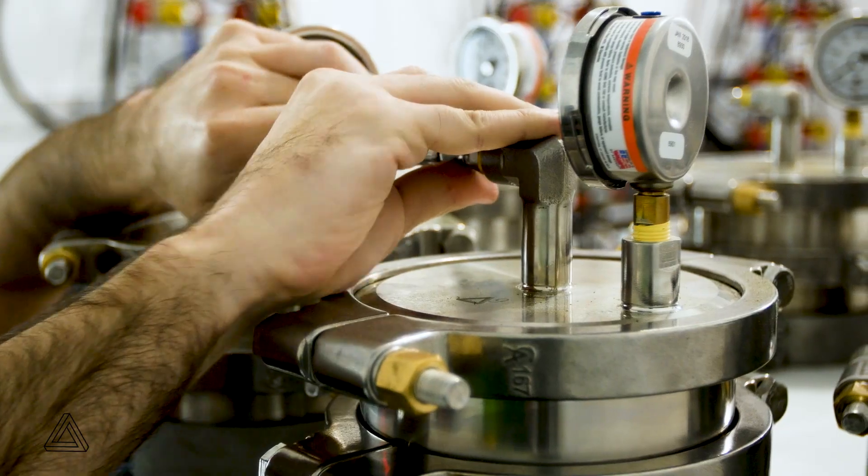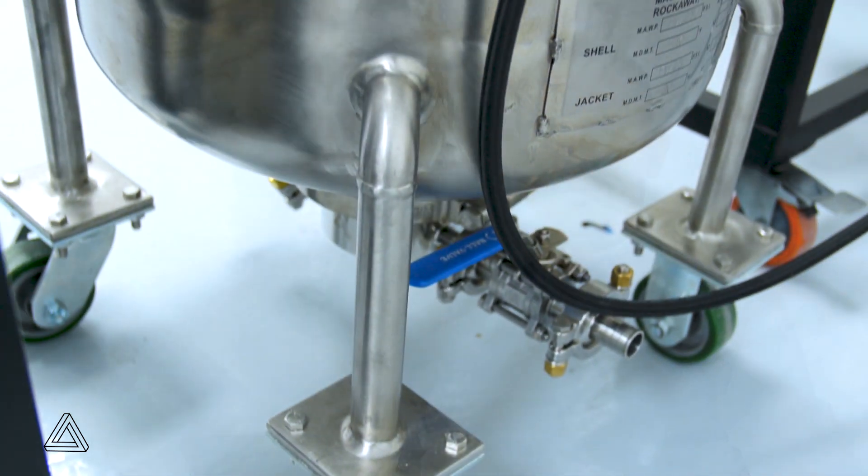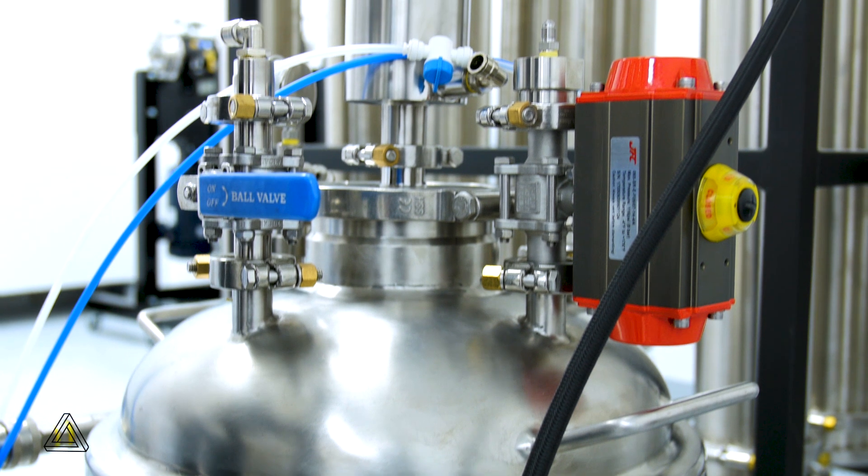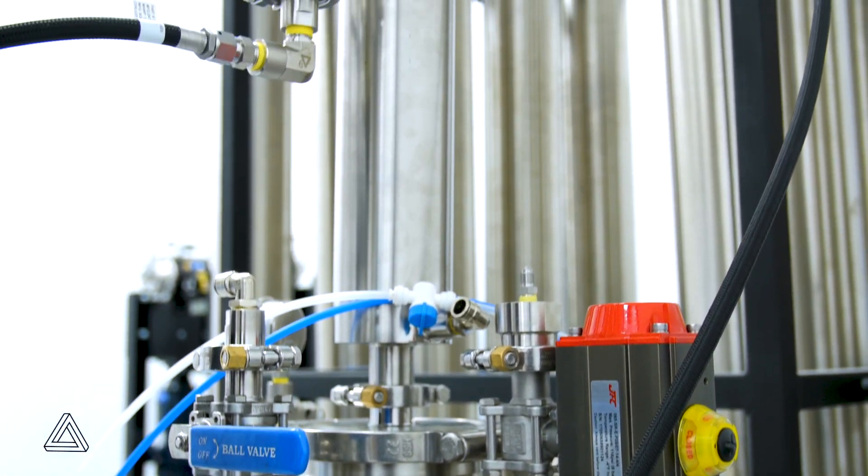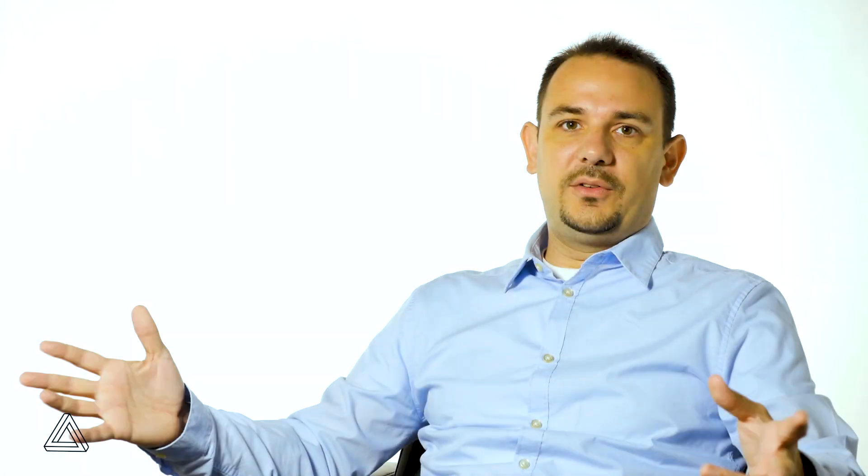The gas tank, the extraction tubes, and the collection pots are all jacketed so that you can run heat transfer fluid or cooling fluid through the outside of the tank. The tanks have an outer layer of fiberglass on them so that when you are heating or cooling, you don't lose that cooling capacity to just the atmosphere.